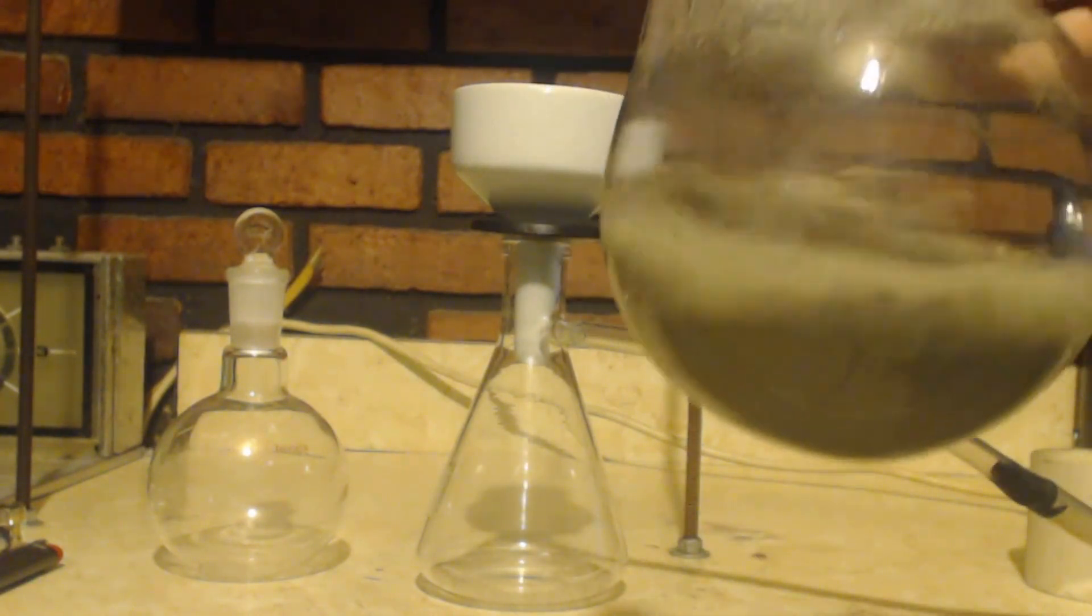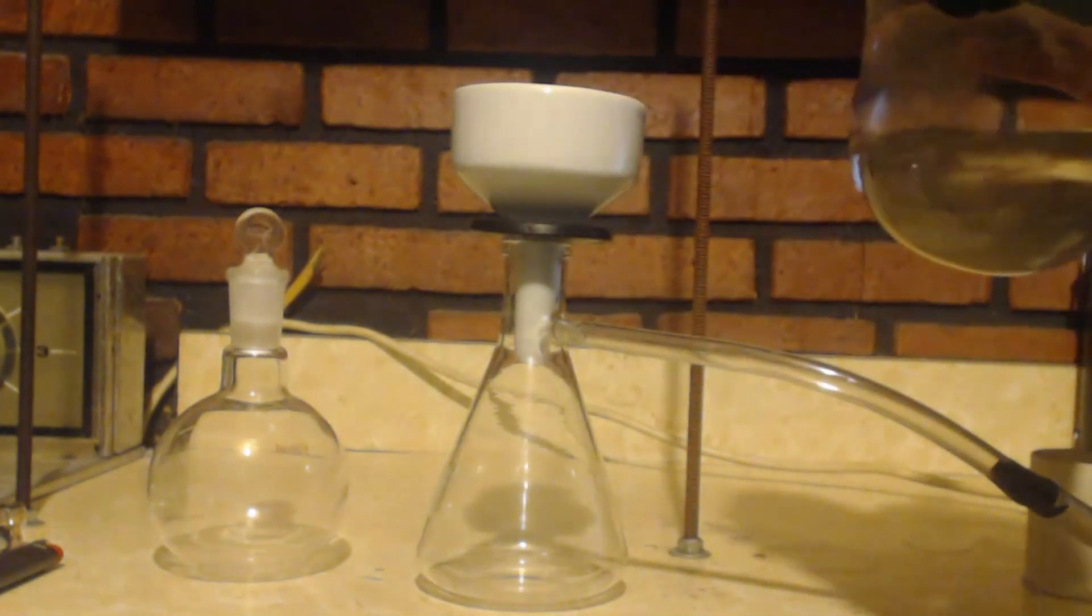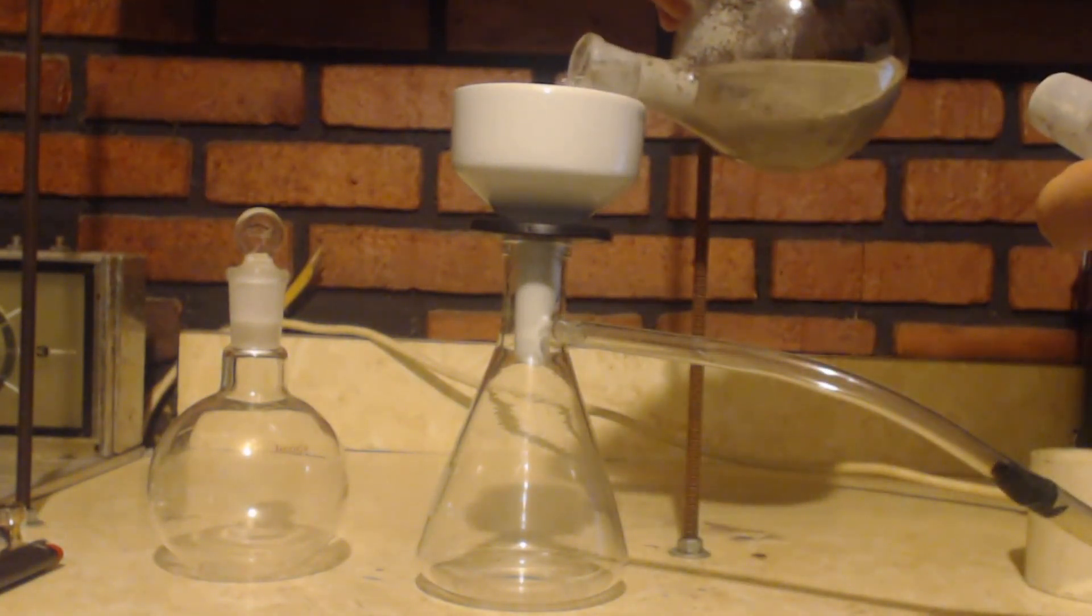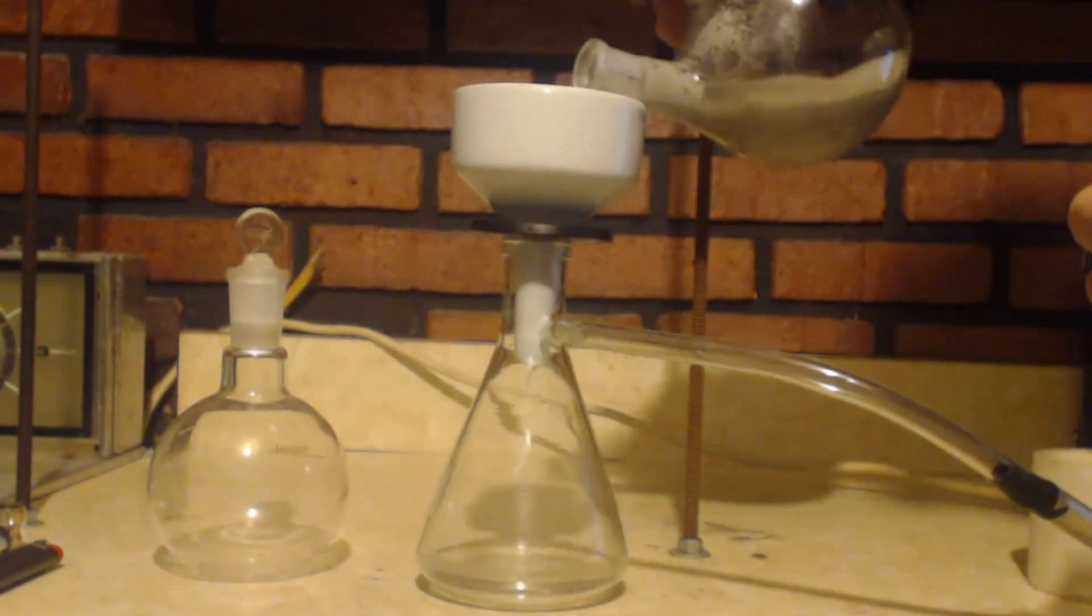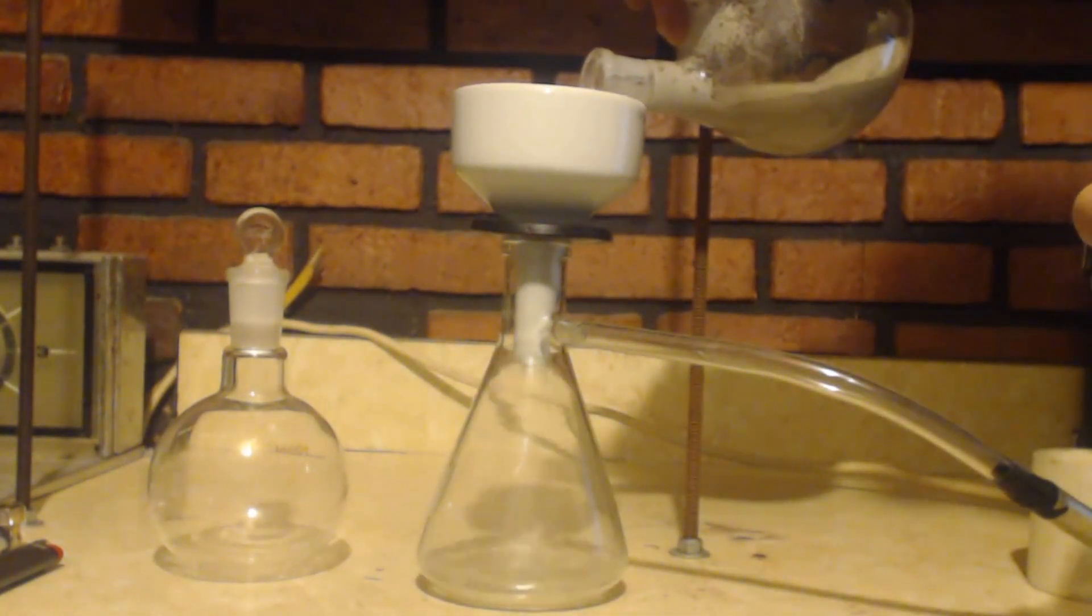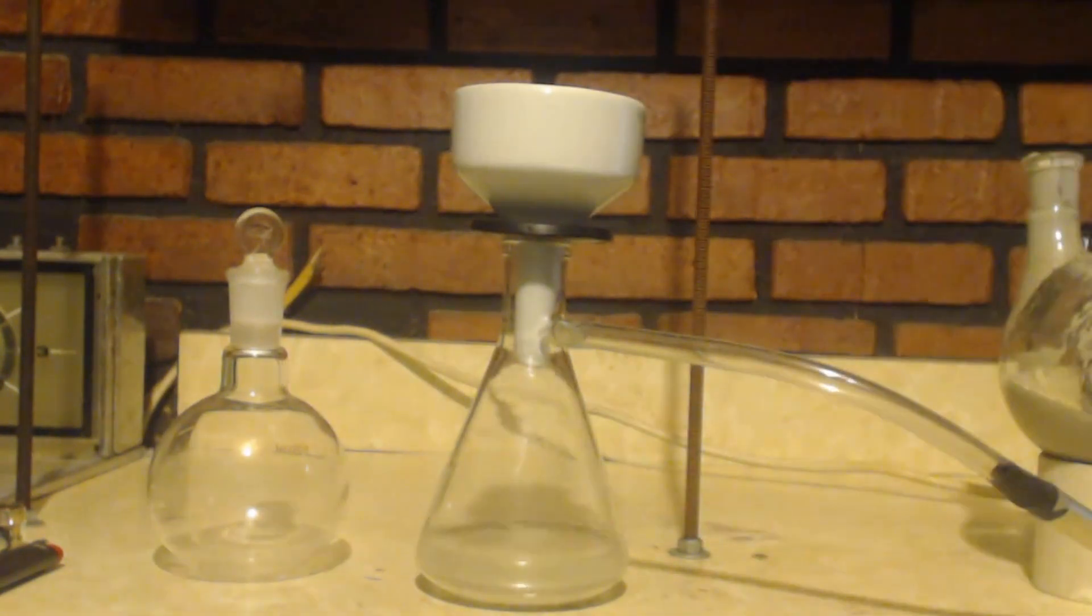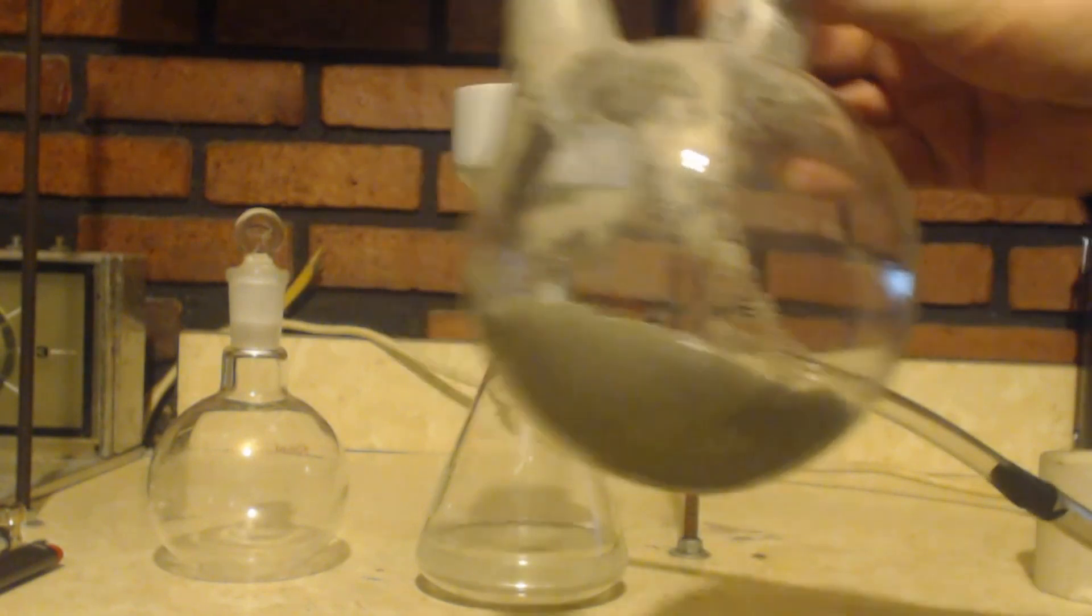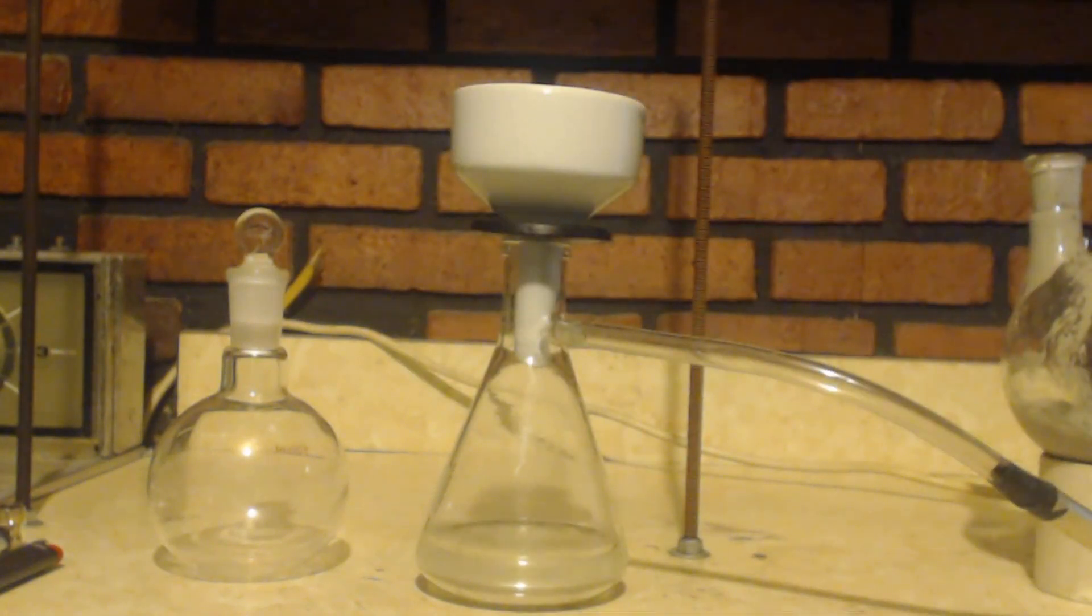It definitely is a different color. So I'm going to filter it all. And I'm going to use some diethyl ether here to wash this all out and get it all filtered.